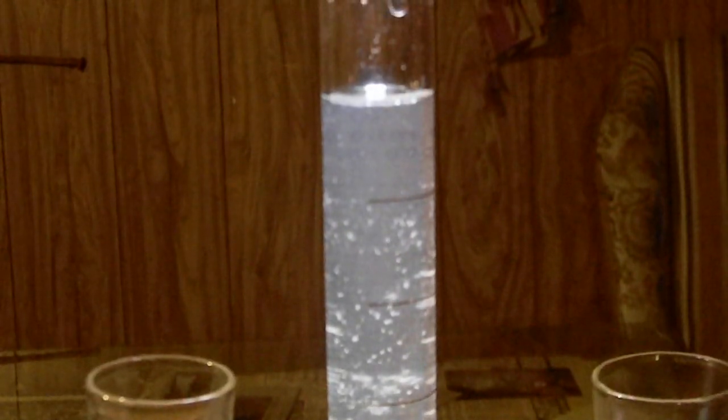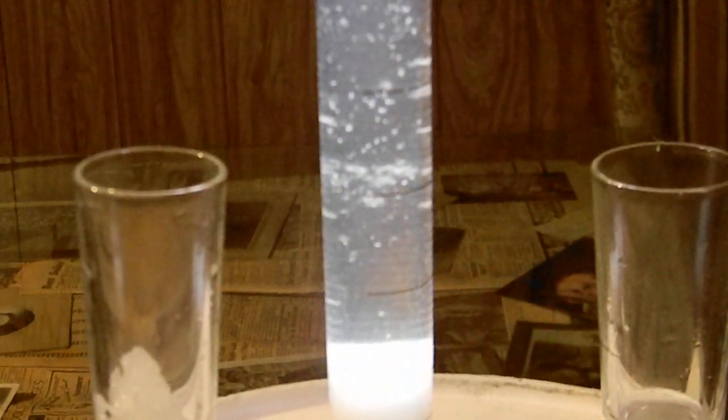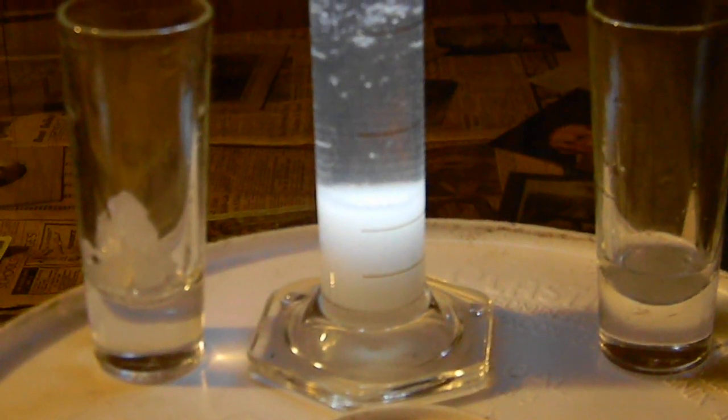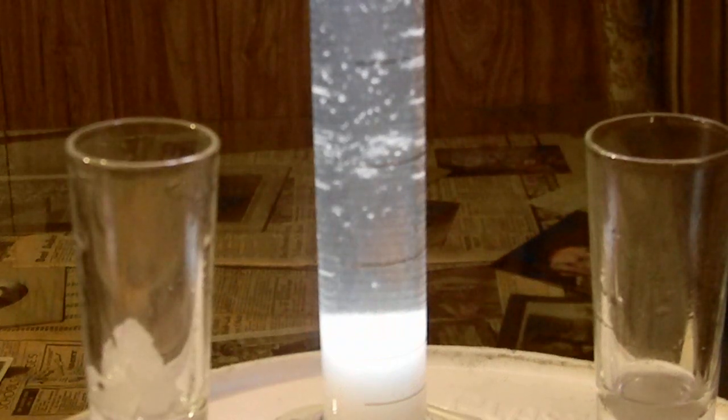You have to do that double decomposition reaction with a completely different salt made in a very similar fashion — actually made out of this salt. It's called sodium perchlorate, or you can do it with potassium perchlorate. But you cannot do it with a chlorate because it'll make ammonium chlorate, which is a deadly explosive — and it is poisonous as well. But if you use a perchlorate to do it, you make what's called AP, which is ammonium perchlorate, which is perfectly fine. But here we used sodium chlorate and a double decomposition to make our potassium chlorate.